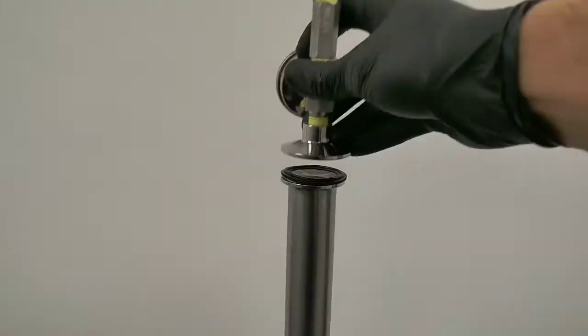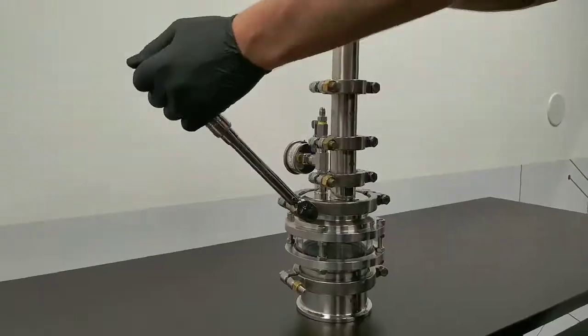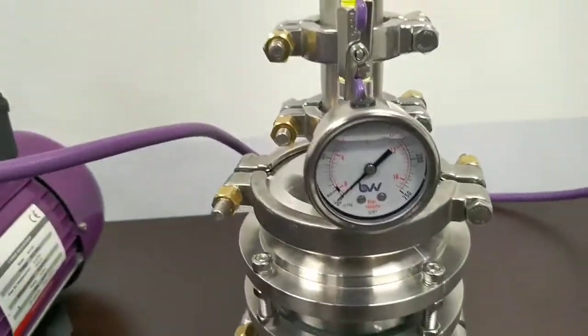Place it atop the filter stack, add the injection manifold, and all your clamps. Torque each one to manufacturer specification and pull the entire system under vacuum.